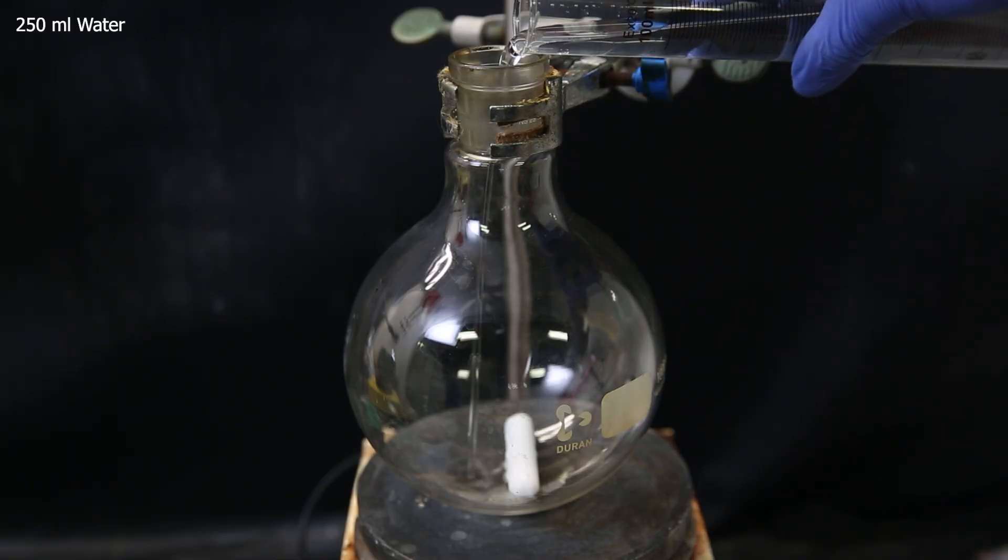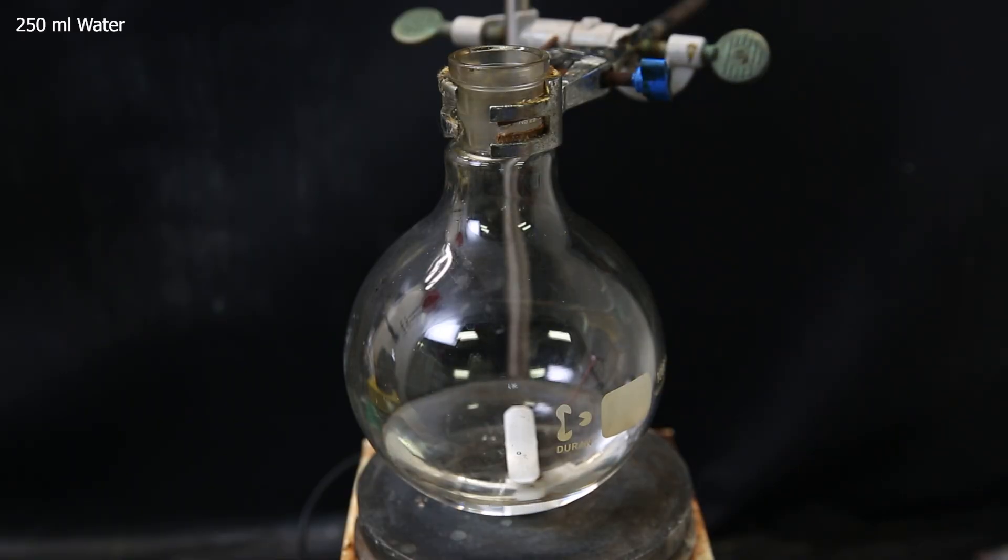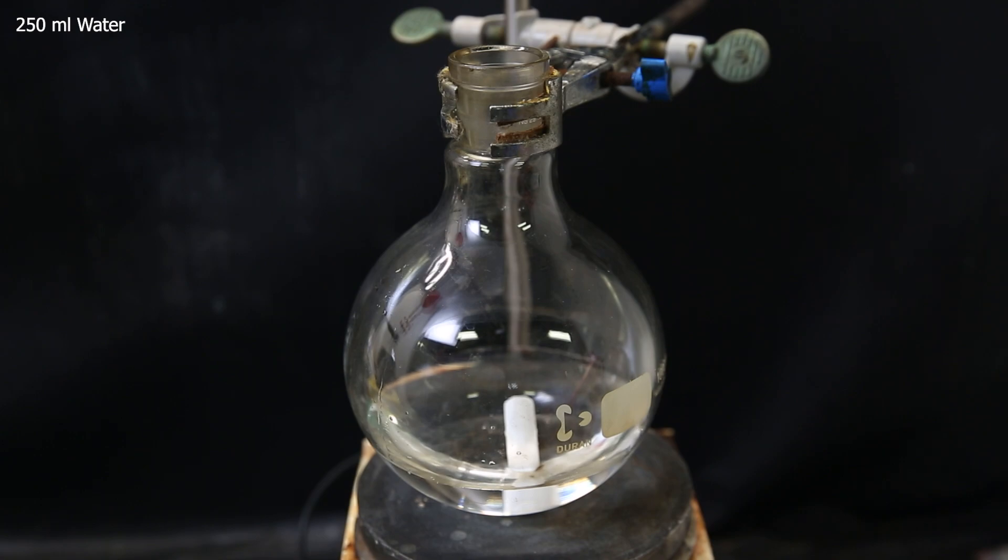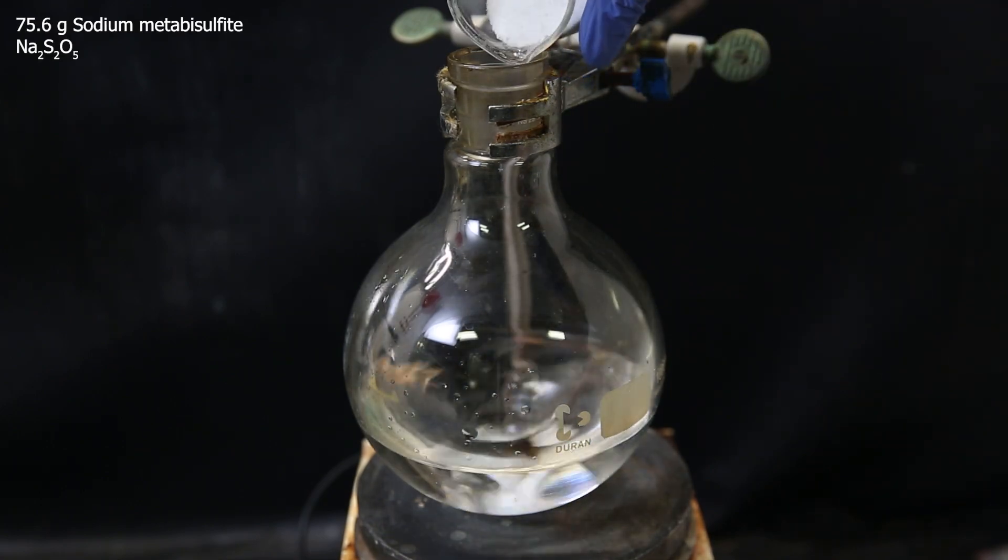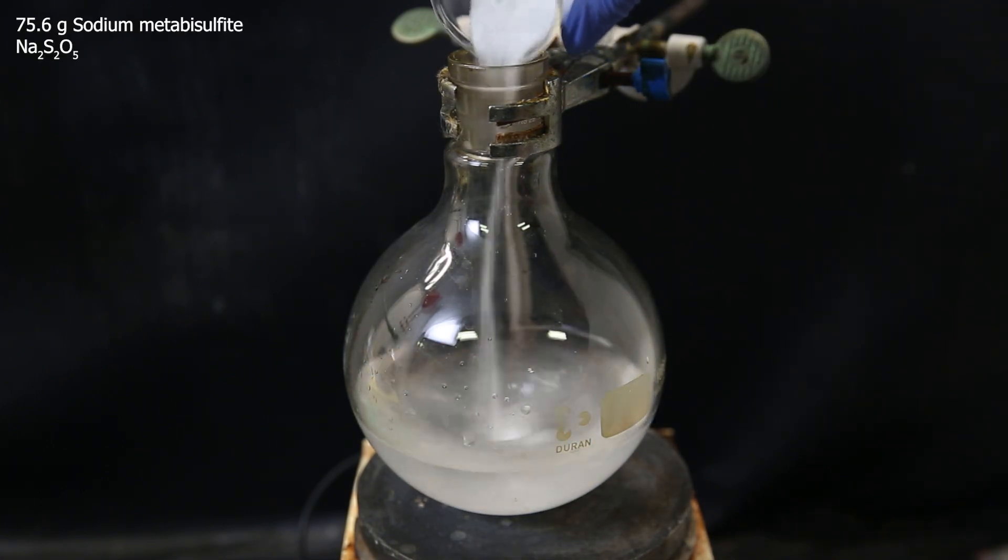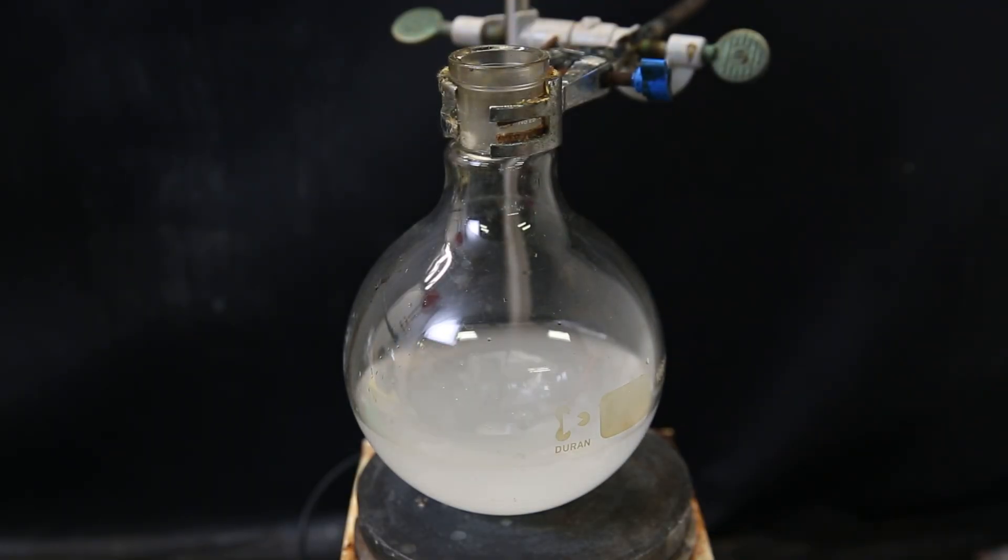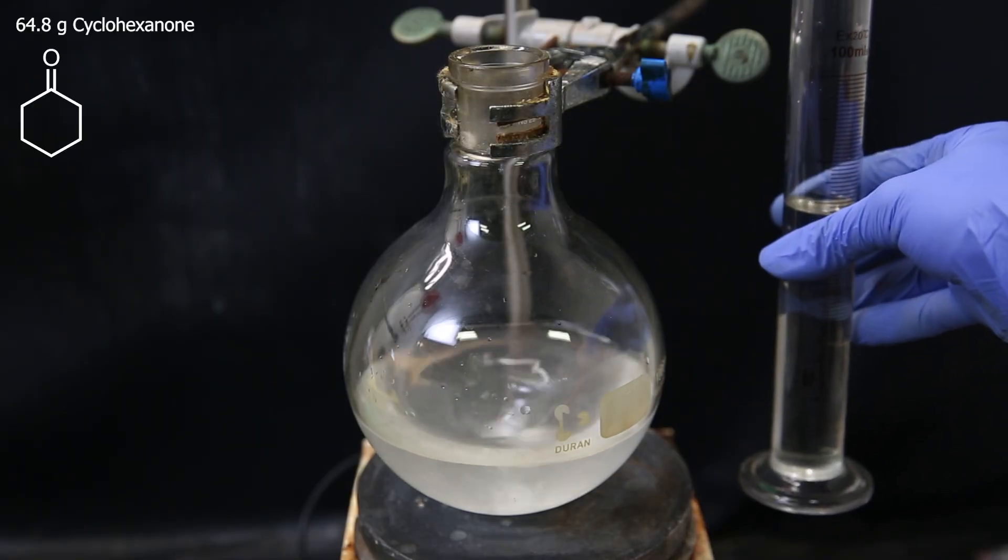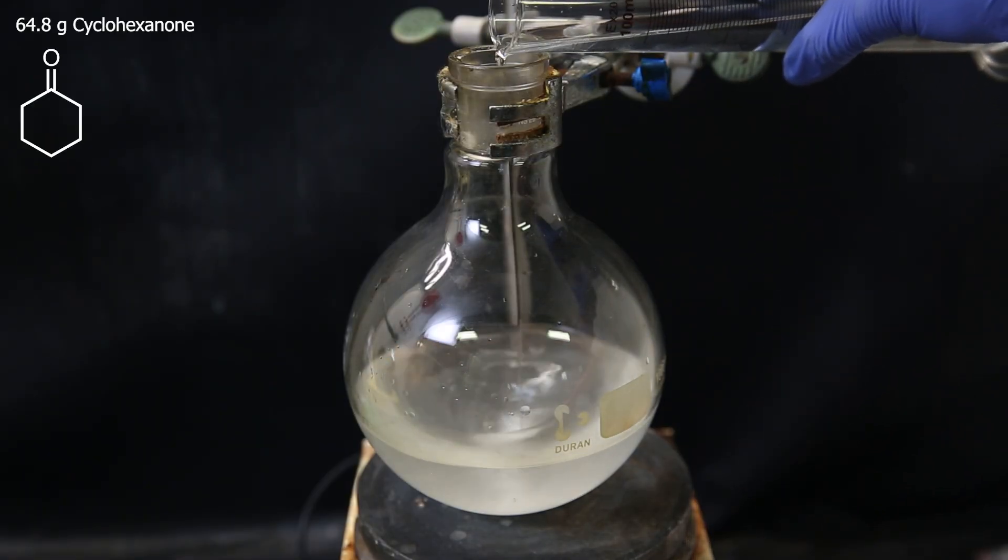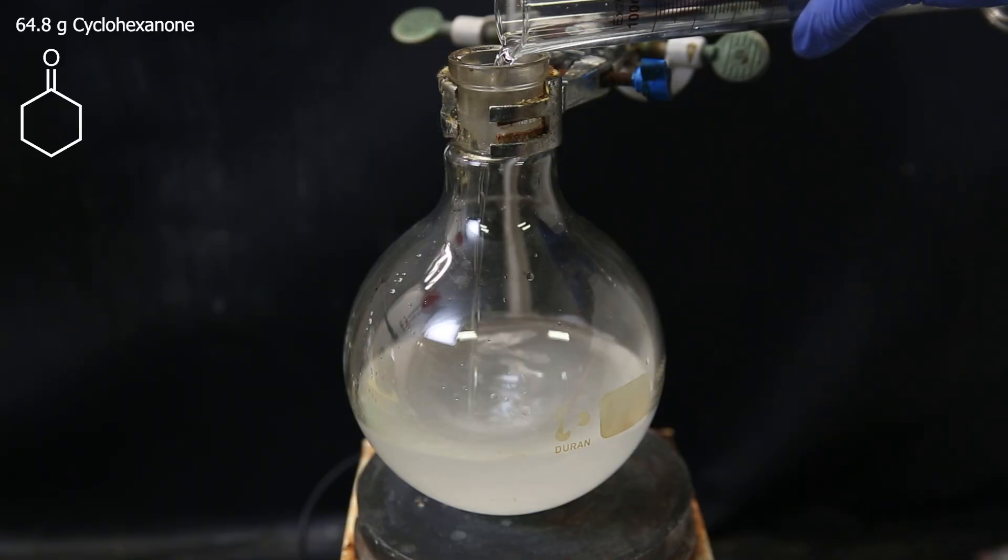So to get started, I set up a large flask with a stir bar, and add in 250 ml of water as a solvent. Into this, I add 75.6 grams of the salt sodium metabisulfite, which will dissolve and form bisulfite ions. When it has dissolved, I add in 64.8 grams of the reagent cyclohexanone.